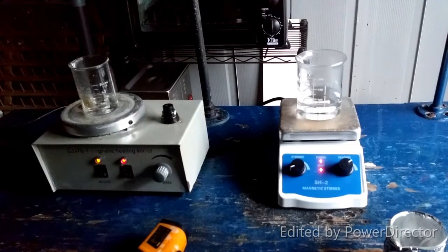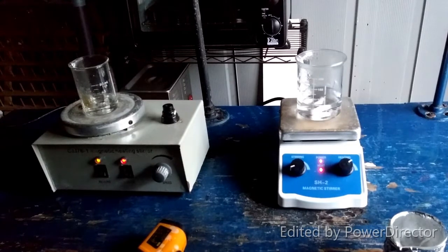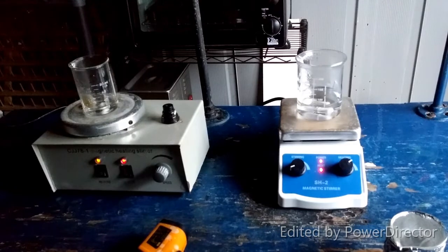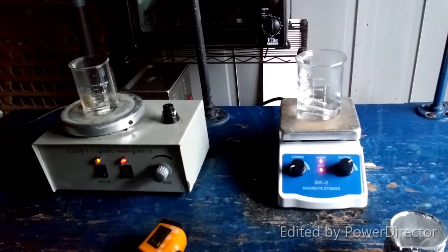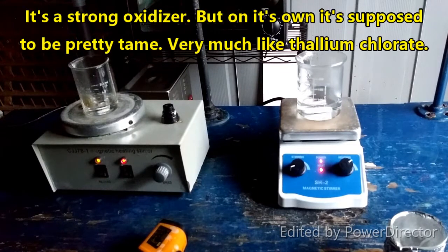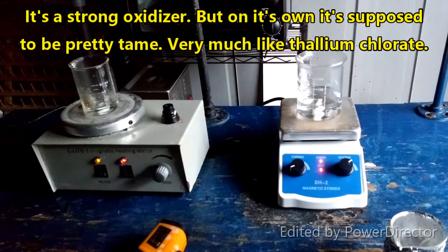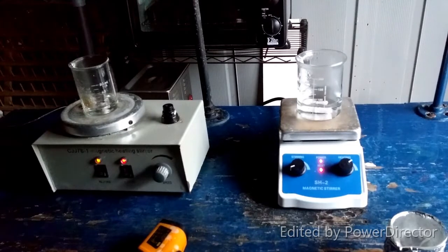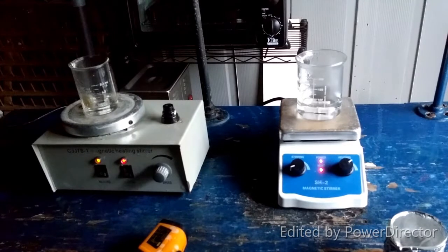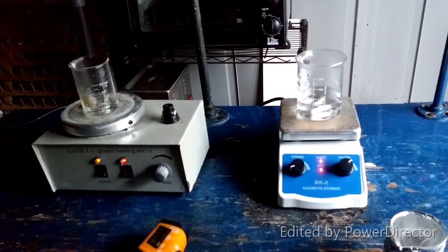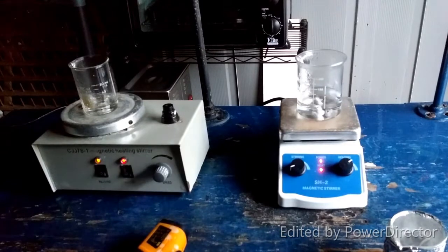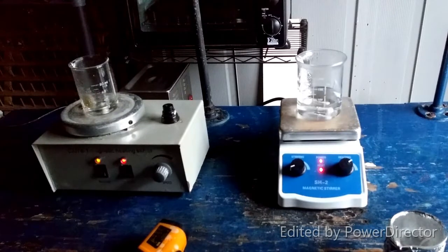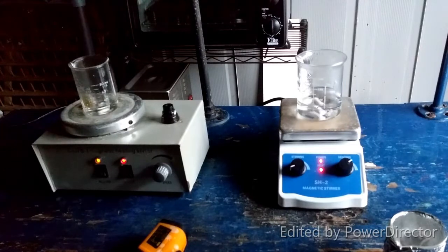Like I said, very easy reaction to do. According to the literature, silver chlorate is supposed to be safe-ish - I mean it's a chlorate so treat it accordingly. Wikipedia said it was used in some kind of primary explosive but it's not explosive on its own. It seems to be a typical chlorate that's more photosensitive than the rest, which is why having to do this with everything so dark doesn't really make for a great video. But I already bought the silver nitrate and I have been fighting with this thing for days so we're doing this.